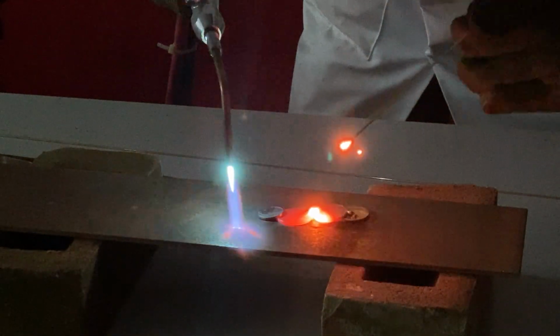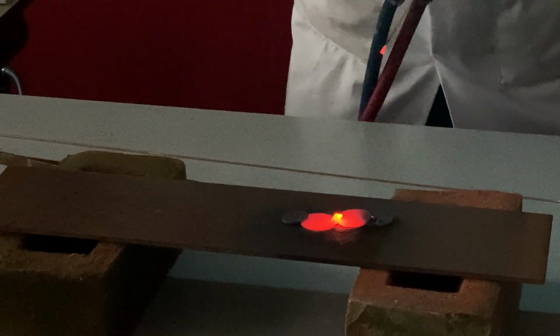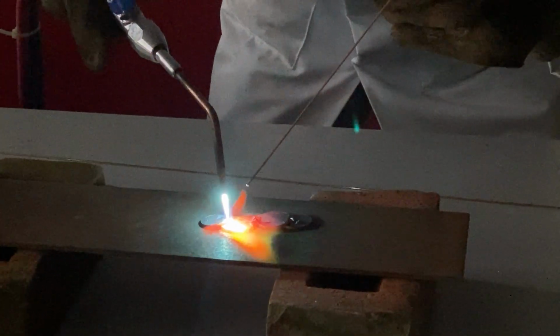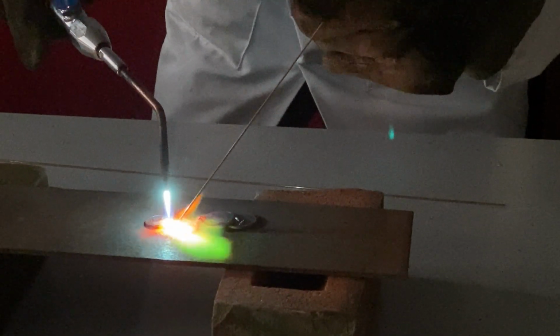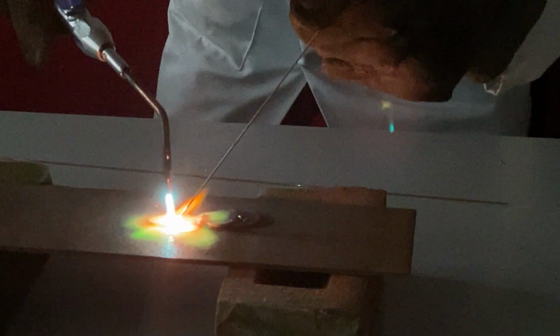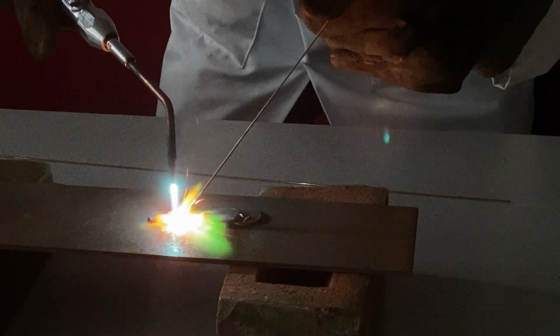Yes, let's just burn that off. Now, the 1p coin I think has become detached. No, it hasn't. Brilliant. So we're still there. Now let's try and do the 1p coin. Once again, we have to get the 2p coin melted first. It's got a higher thermal capacity. Once that one's got a bit of a puddle, then we move on to the 1p coin. And there it is. It's getting slowly a little bit more. A little bit more.